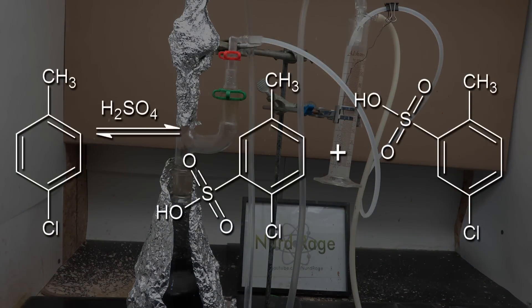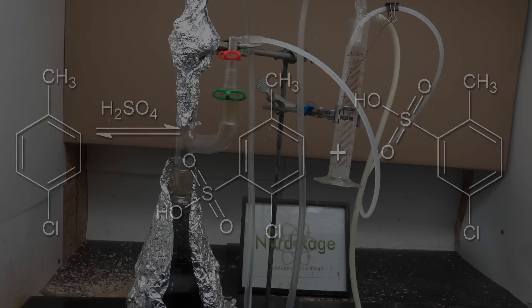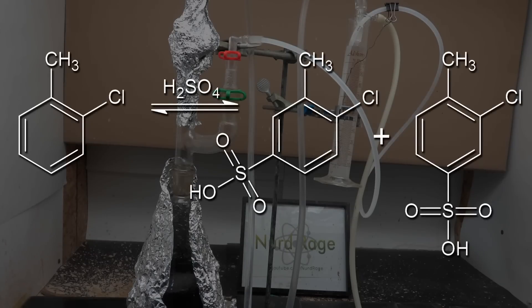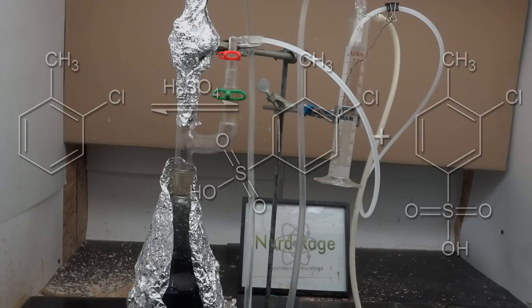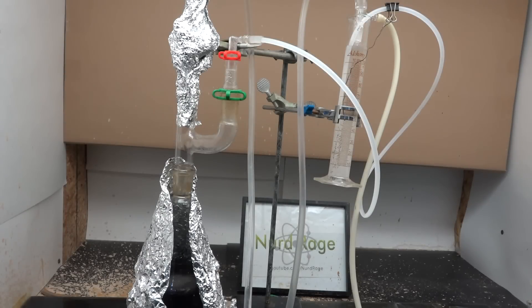Now even though some of the parachlorotoluene is reacting, this isn't a problem because the reaction is reversible. So the sulfuric acid regenerated can go to react with the ortho isomer. If we use equal or less sulfuric acid than the ortho isomer, we can get almost exclusive ortho sulfonation. Unfortunately this is rather slow. So keep the reaction running until the water content in the Dean-Stark trap stops increasing, and then run an extra hour to ensure equilibrium is reached.